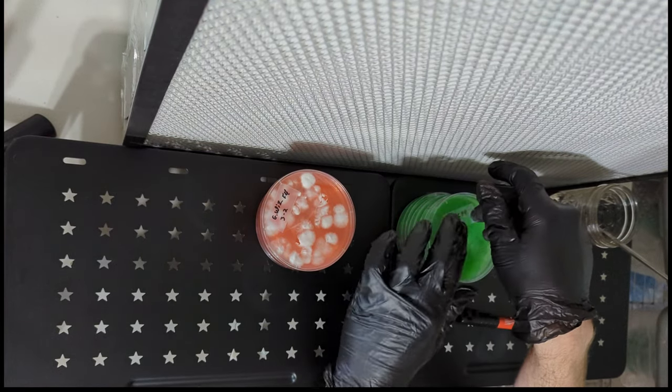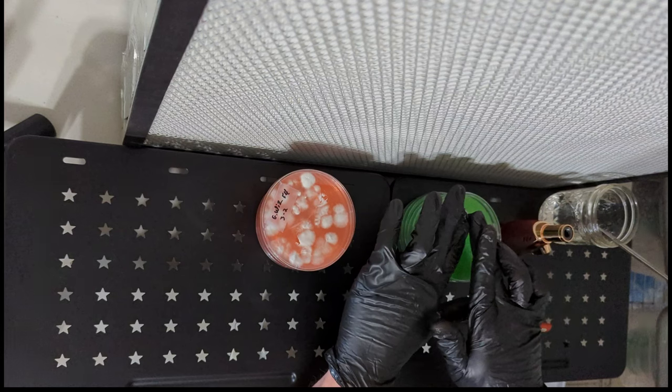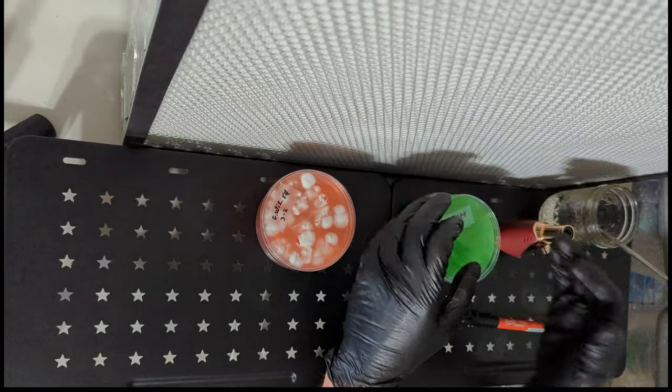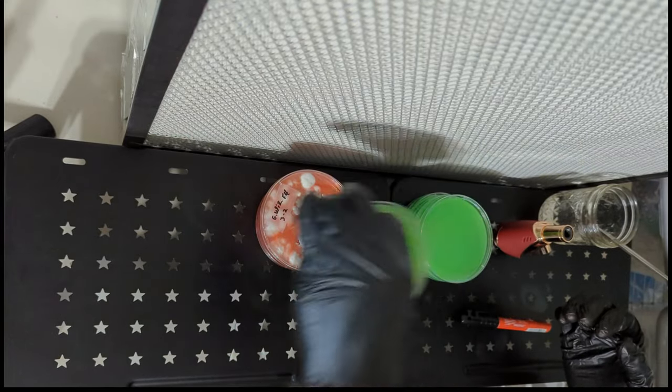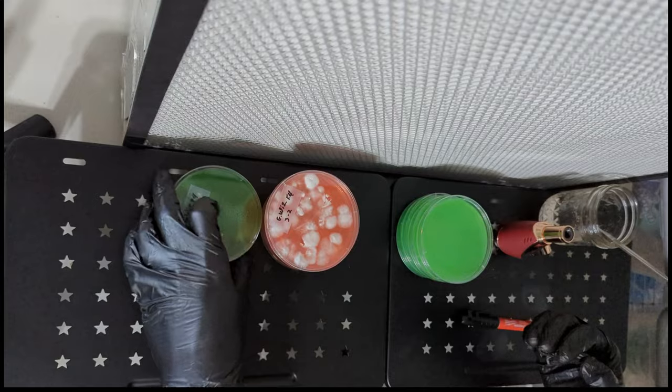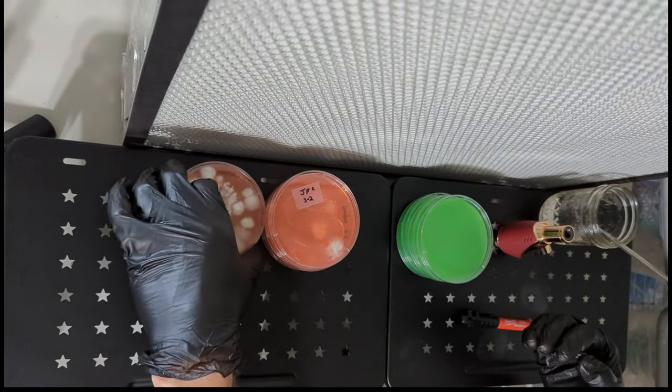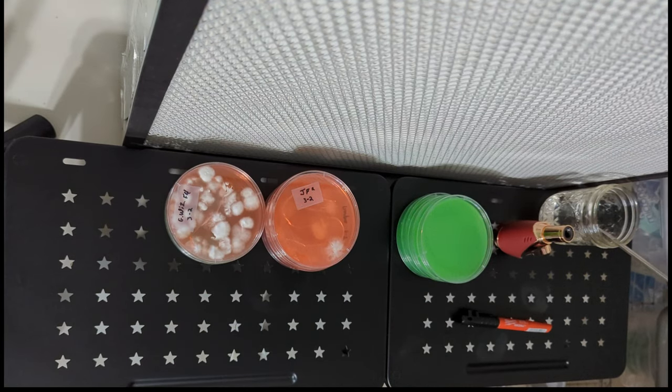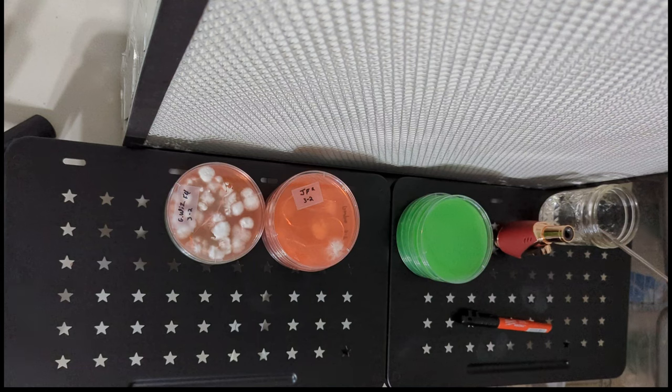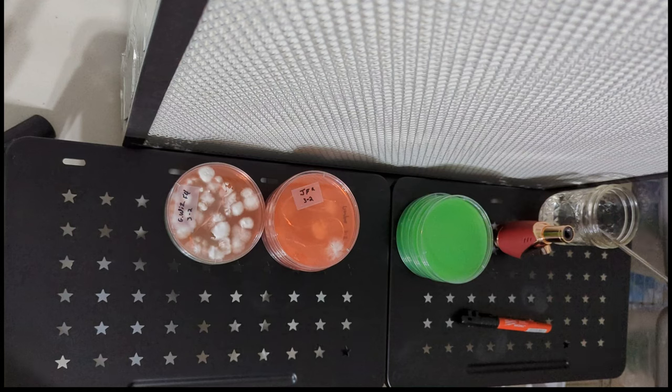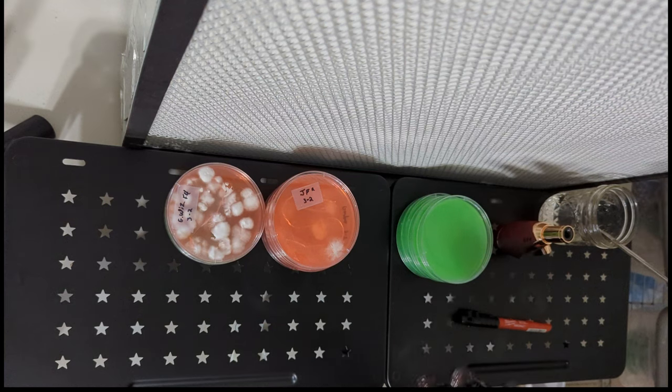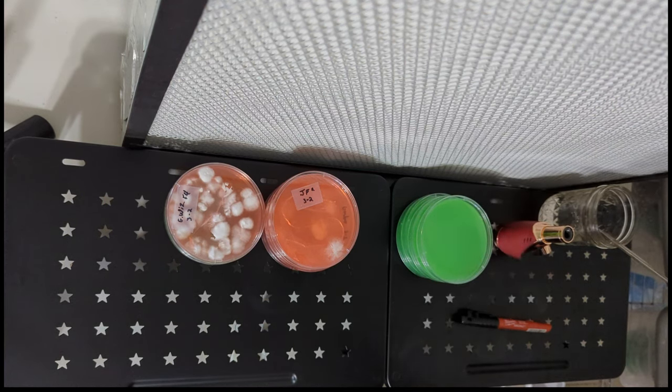Subculturing is just taking a small sample of mycelium from a culture and isolating it on a new plate or away from anywhere where spores are germinating or another culture is. We would usually let this plate grow out and inspect the mycelium for contamination and variation. Even though we separated the sample from the rest of the cultures, it's possible there are still more than two spores or one culture even in the tiny piece. This new plate is called the T1 plate for transfer one or first transfer.